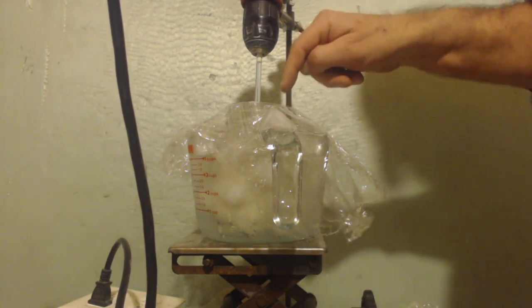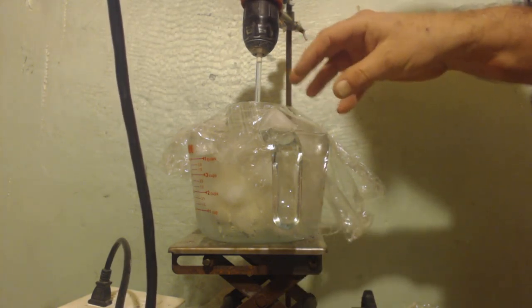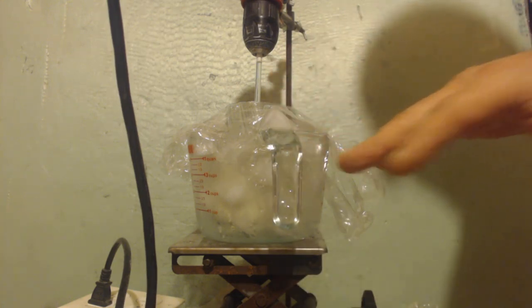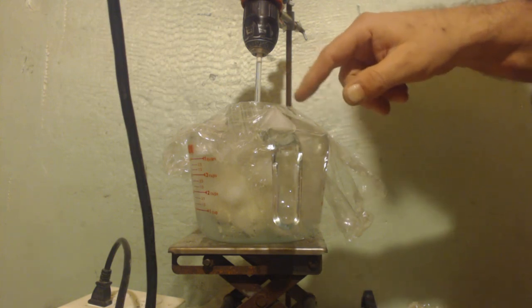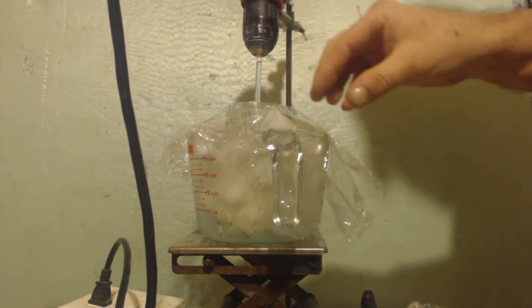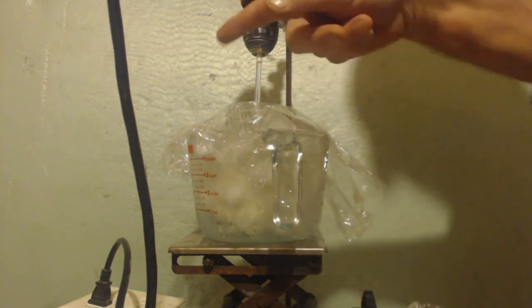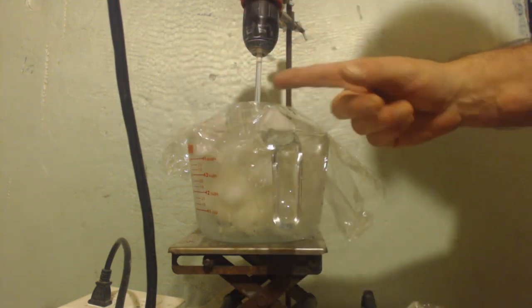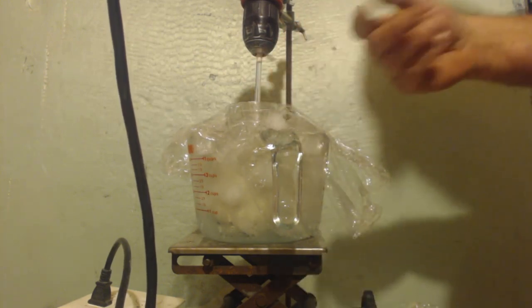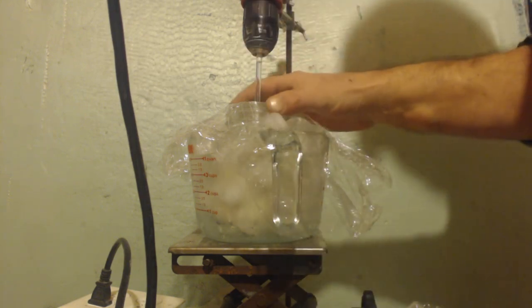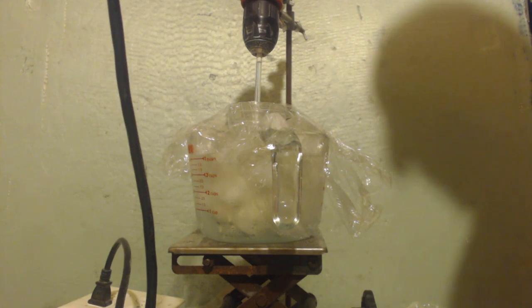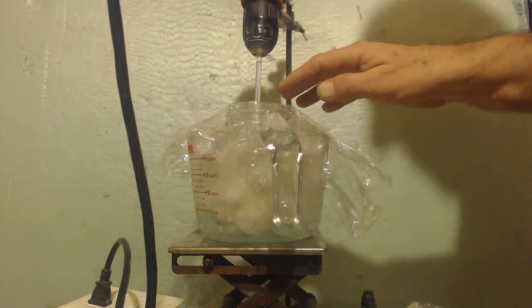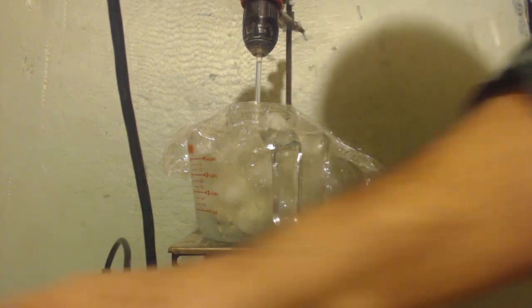I did also want to bring up this cup inside this bigger cup. There's ice and it's slippery. This cup is going to move back and forth. And the way I stopped that from doing that is I put the ice in first so that it can't move back and forth. The ice is just enough to fit in there all the way around. So when I see the ice starting to move back and forth, like it's floating instead of just sitting here, I will take out some of the liquid and put more ice in it so it can't move around but make sure it's adjusted all right. Then I turn it back on. Otherwise, this cup would, I noticed, when it melts and it can move, it does.